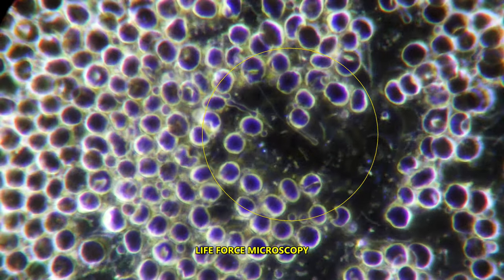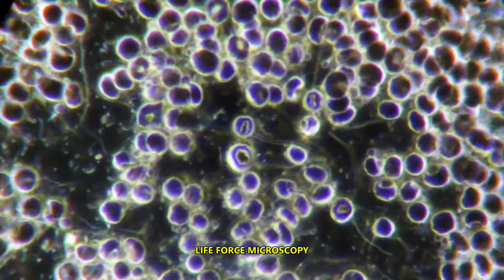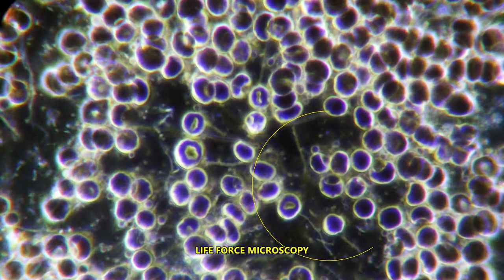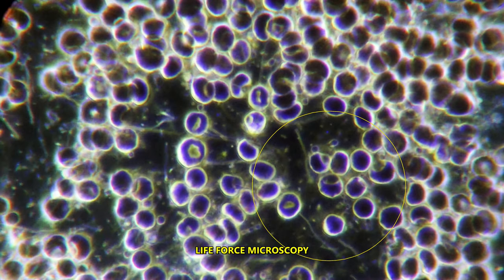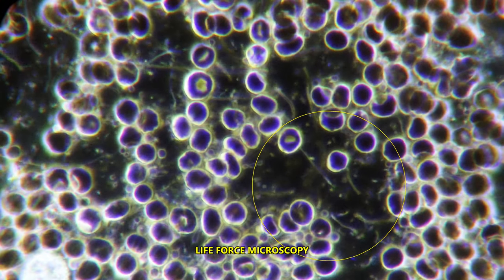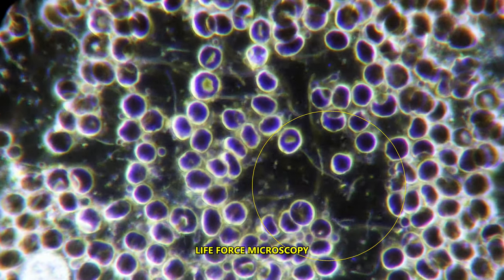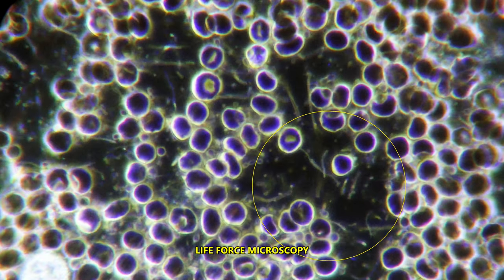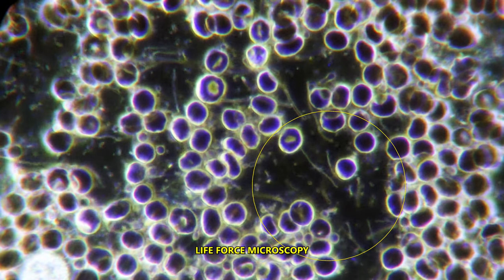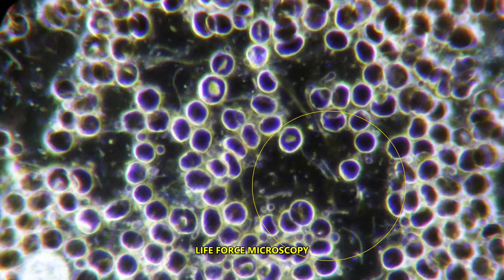Of course, you cannot be specific in saying that this person has diabetes or cancer or anything like that. It is not possible to diagnose specific conditions by just looking at a sample of blood, as far as I know. Diagnosing heart disease is really one of the best things that I have seen while using dark field microscopy, because you can actually see if a person has heart disease or will have it.